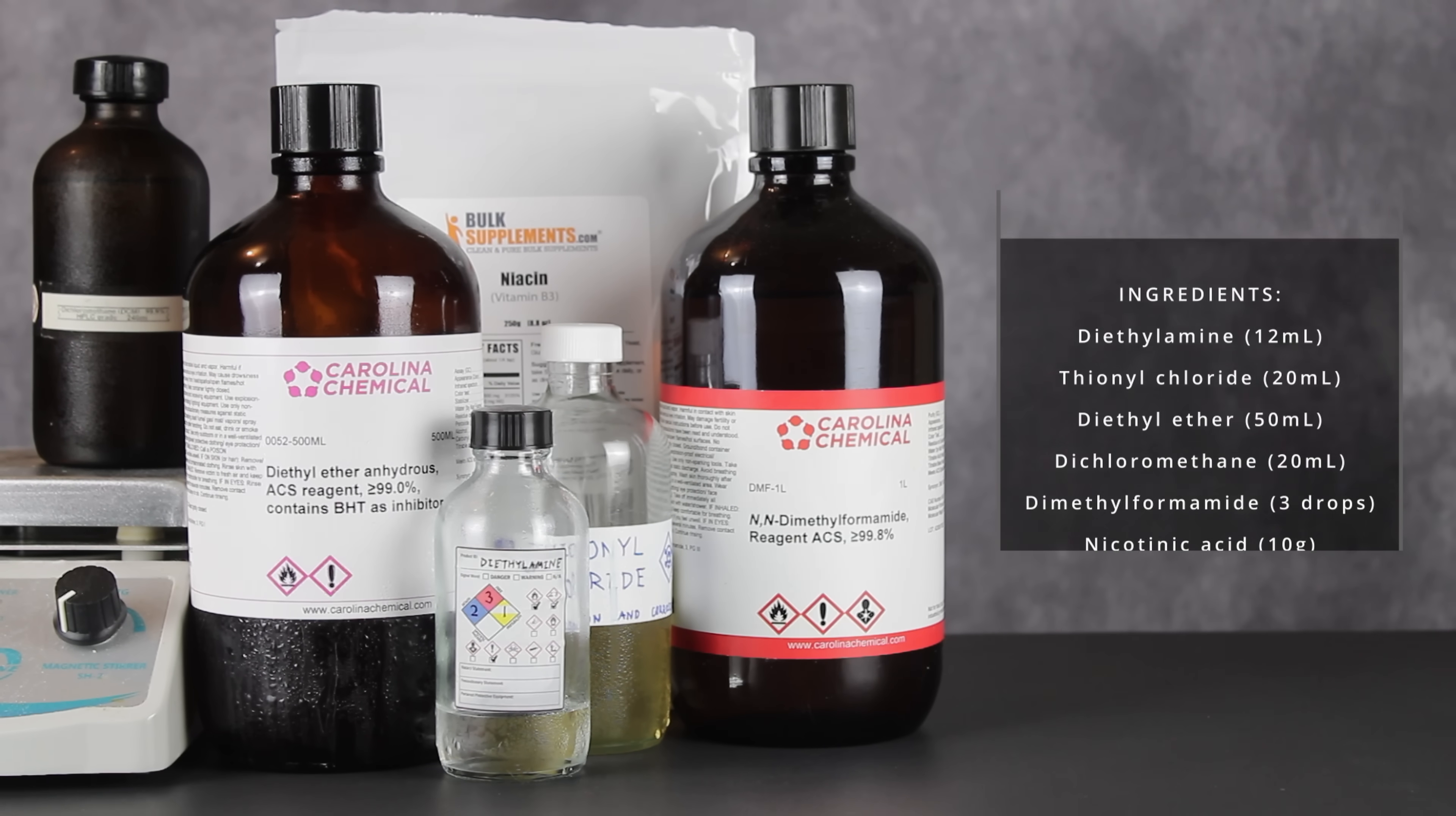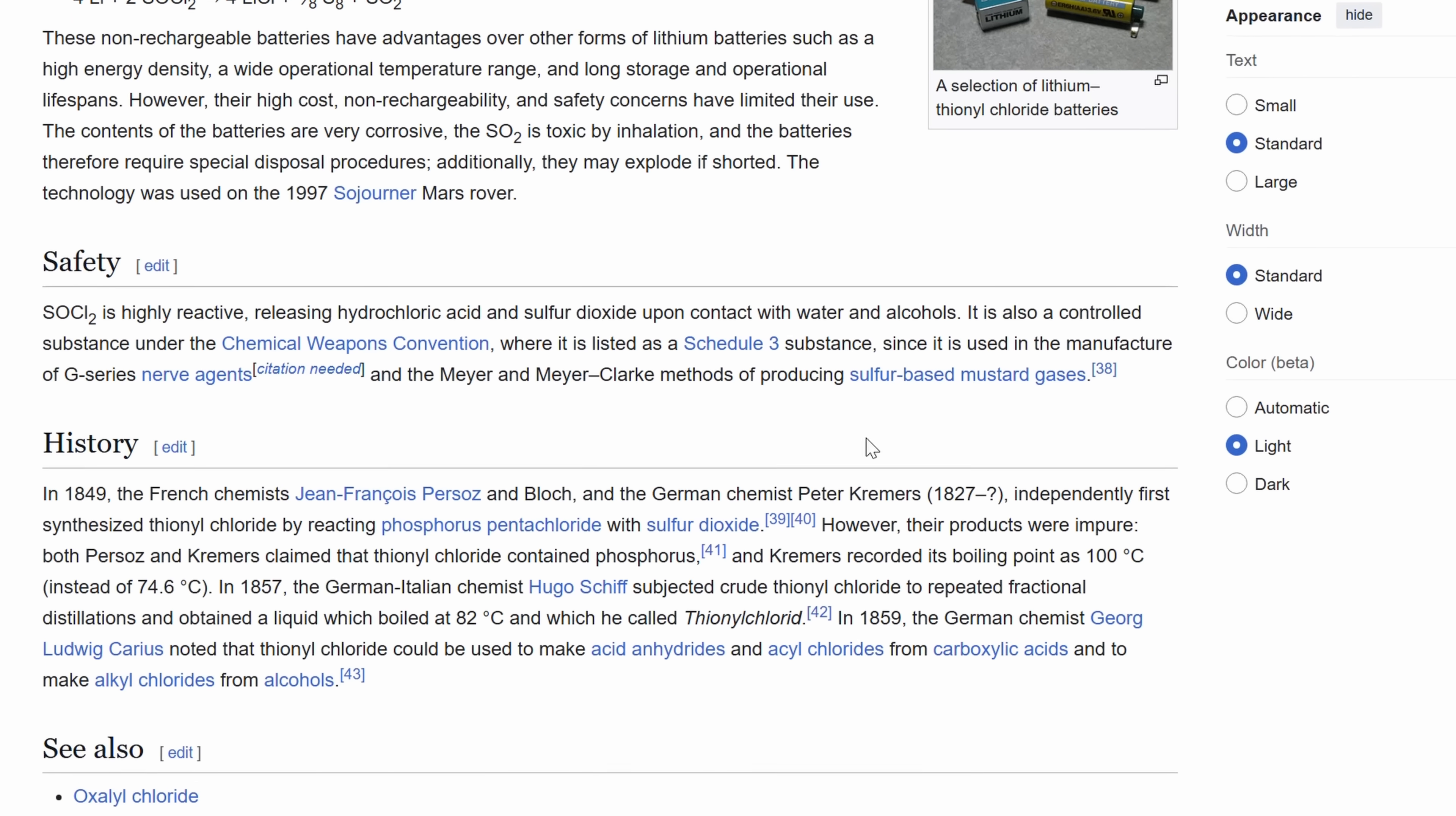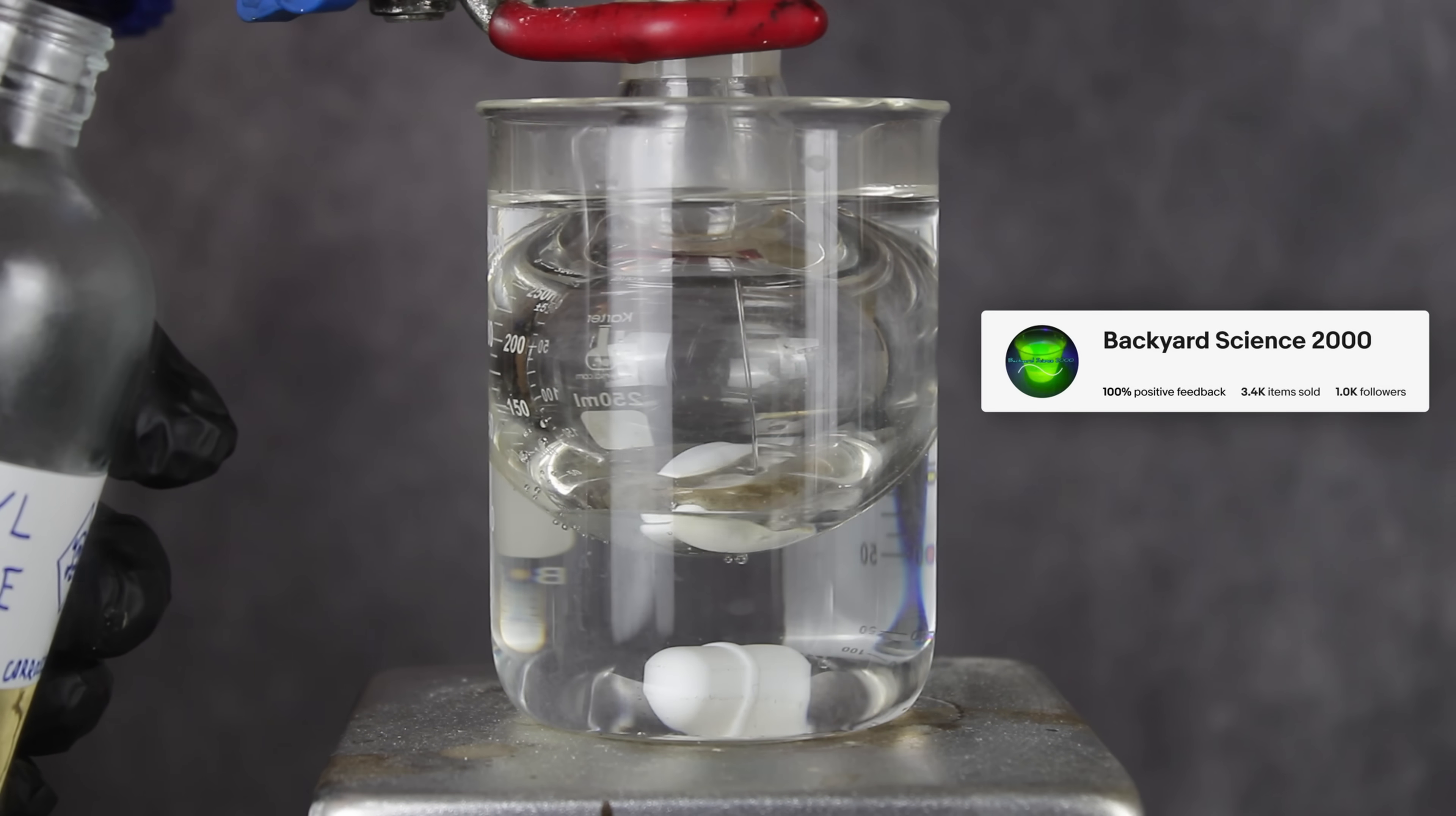To make nikethamide, I ended up going with the following reagents: diethylamine, thionyl chloride, diethyl ether, dichloromethane, dimethylformamide, and nicotinic acid, otherwise known as niacin or vitamin B3. Most of these are pretty standard reagents, but thionyl chloride can be a bit tricky to source, since it's kind of a major precursor to a lot of banned drugs and chemical weapons. Still, it's legal to own, and I was able to get some from an old friend of the channel, Backyard Science 2000, on eBay.